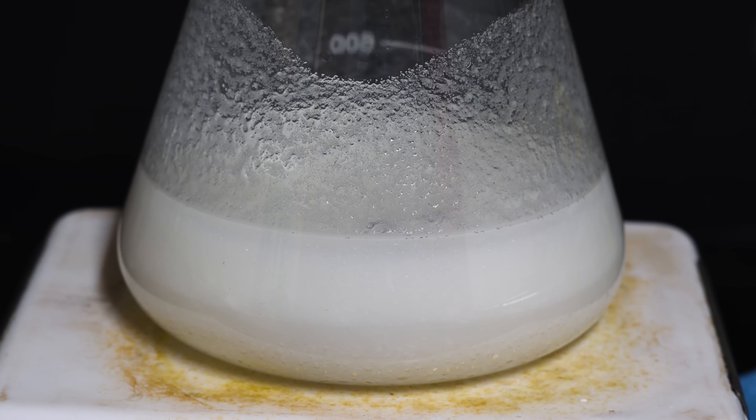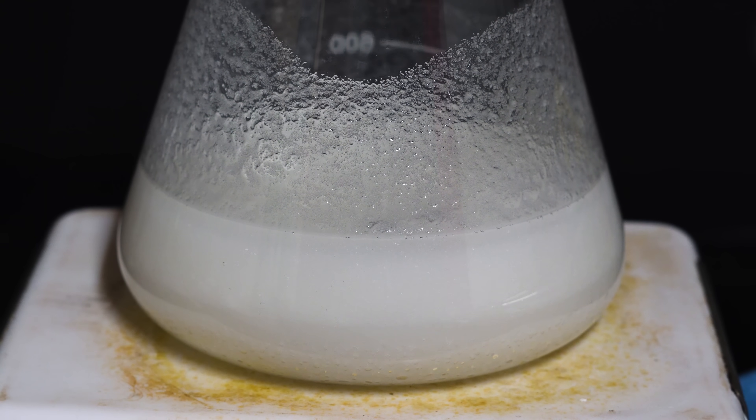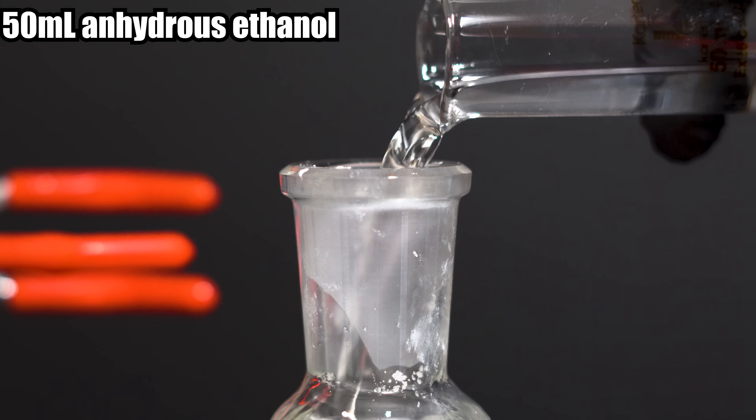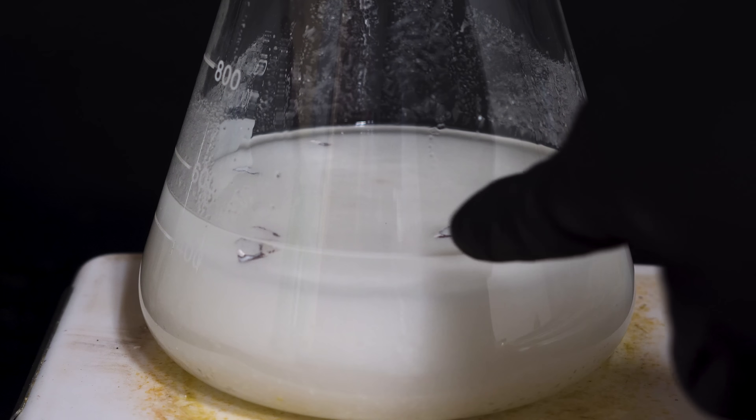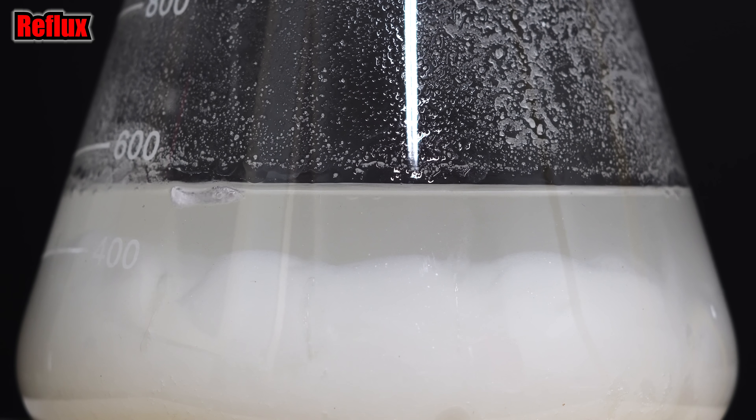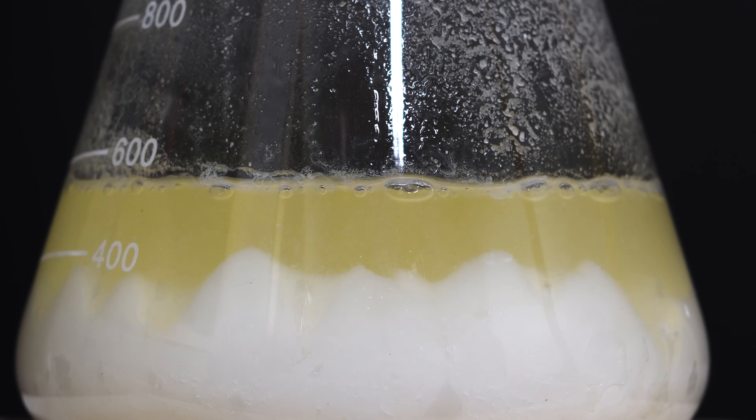After adding all the powder, it looked really dry and I decided to add some more ethanol in there. I added another 50ml of anhydrous ethanol. I only had a little bit of sodium metal left and I decided to wait until it was done reacting. And by that, I just mean I started the reflux. This should help to speed up our sodium and ethanol reaction and start the distillation process. The solution also turned yellow after I started heating it up.